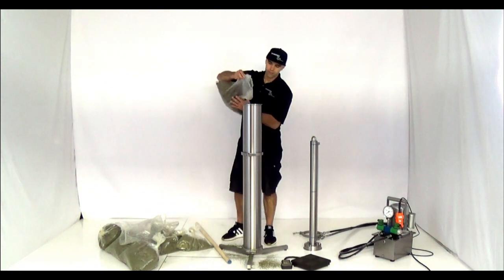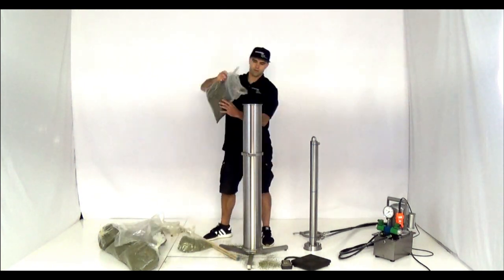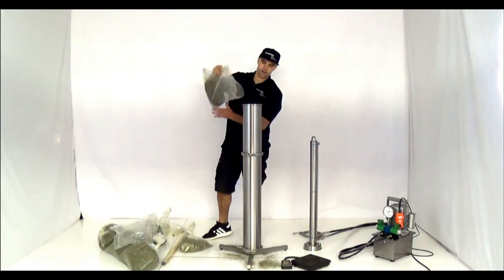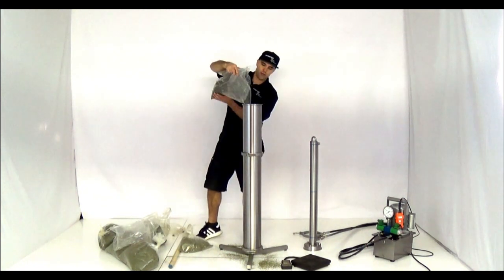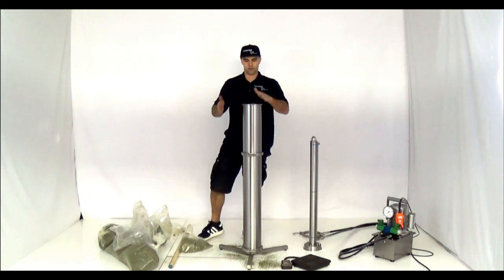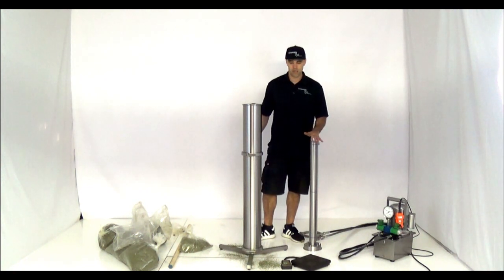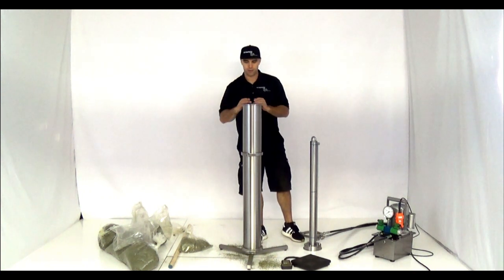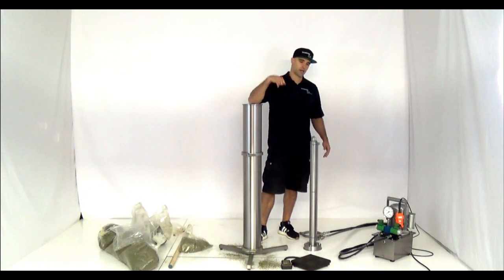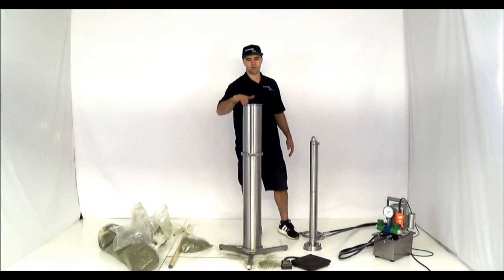Now I'm going to add some more material. We're pretty much at the top, and I'm not too concerned about packing it down real tight — we're going to let the hydraulic cylinder do all the work for us. This is the 32 inch stroke and it's about 45 pounds, which isn't too bad but it might be for some people. We do have a vertical rack that I'll show you in another video that will hold this for us and we can use a hand crank to take it up and down.